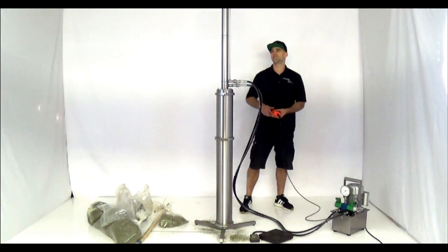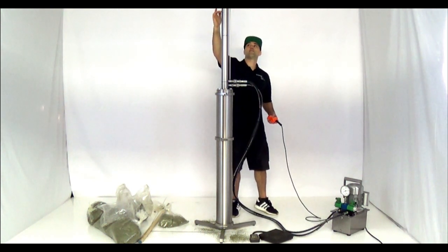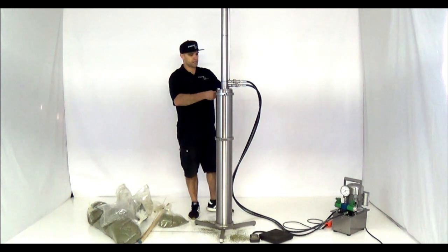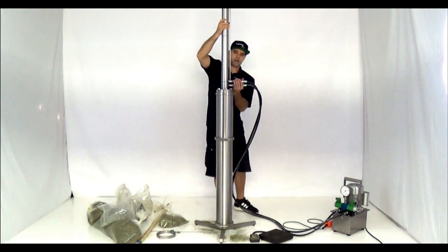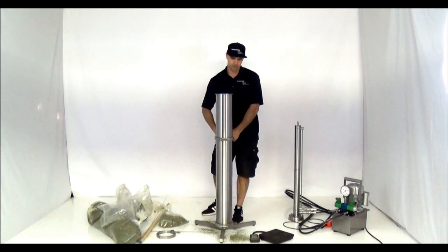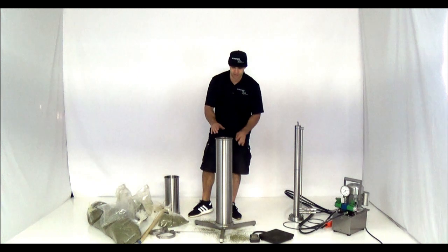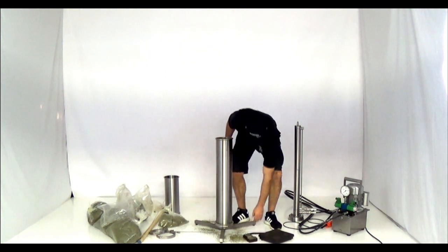Now I need to bring the closure back up since it's all the way down. We're going to bring it back up — it comes up quite a bit faster than it goes down. Now we're all the way retracted and there's no pressure on anything, so I can take these clamps off. Start with the top one, take the Iron Fist off and set it down. We've got an empty hopper column. I can hear the material just slightly popping every now and then, so I know it's expanding. We still have about a good half inch of head space in there, so not a worry.